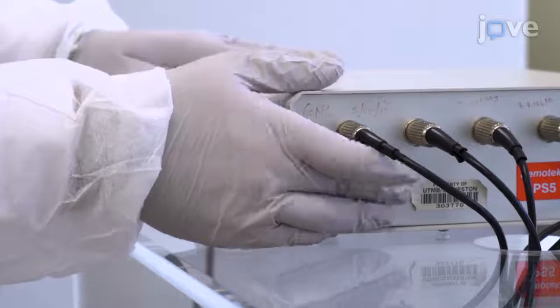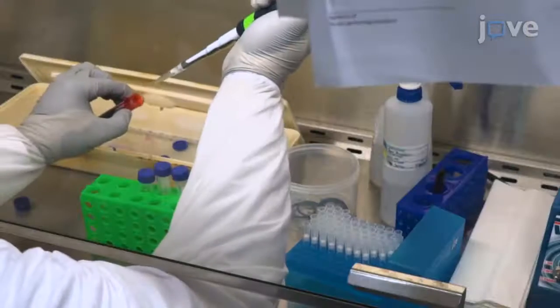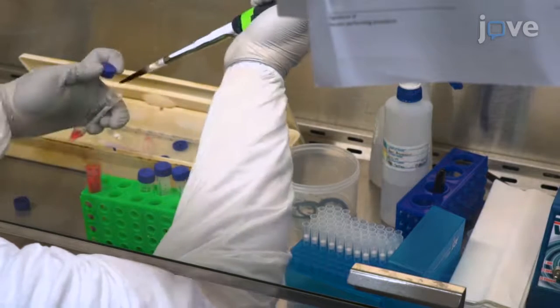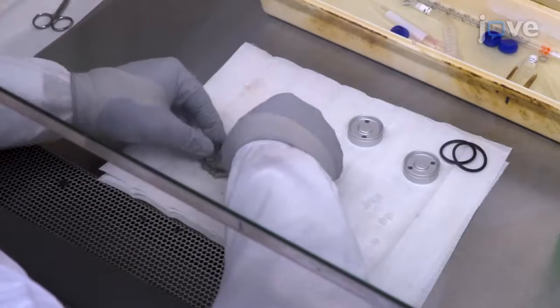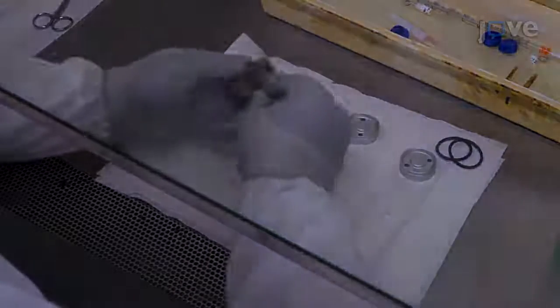On the day of exposure, turn on the power source in an arthropod containment facility to preheat the feeding units. Combine freshly harvested citrated or heparinized human blood with a viral stock at a 1-to-1 volume ratio. And overlay a standard 3 milliliter reservoir unit with the skin of a naive, uninfected mouse.